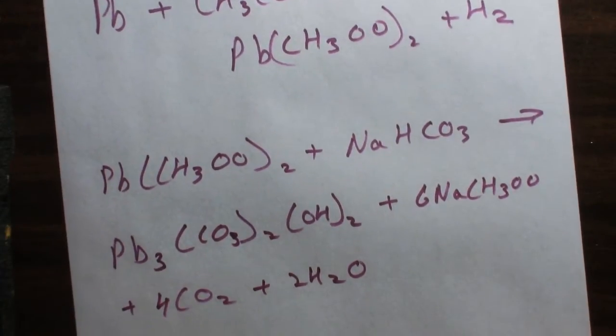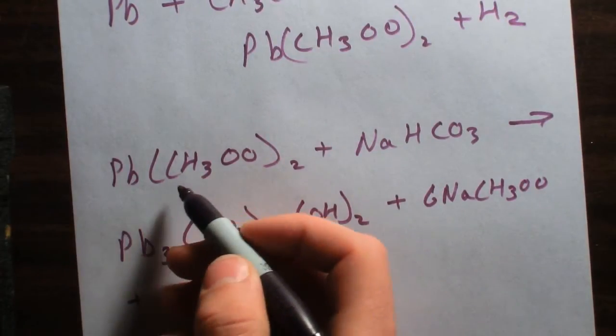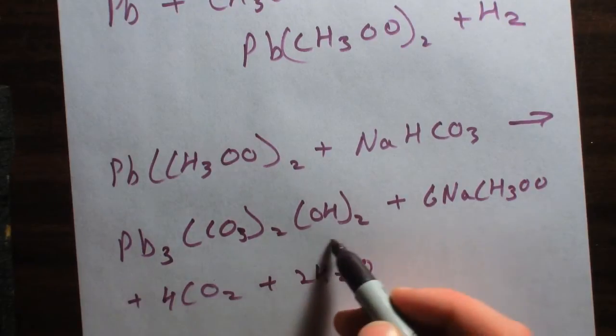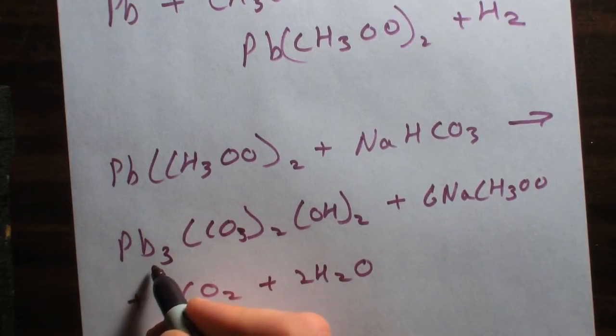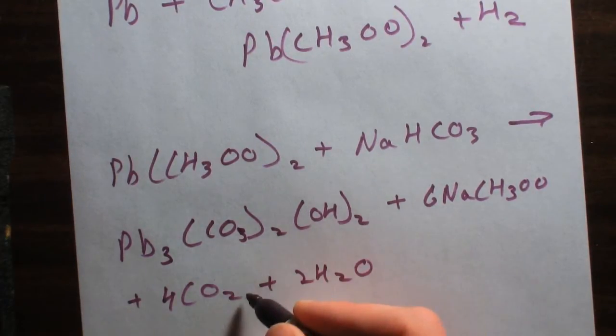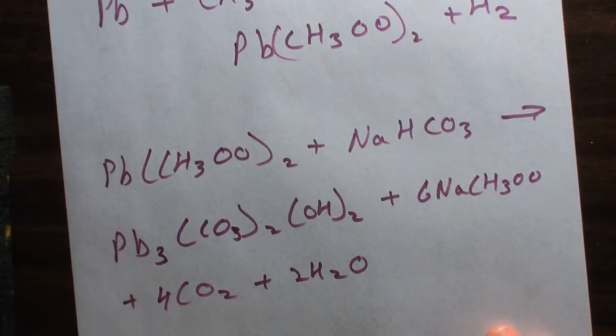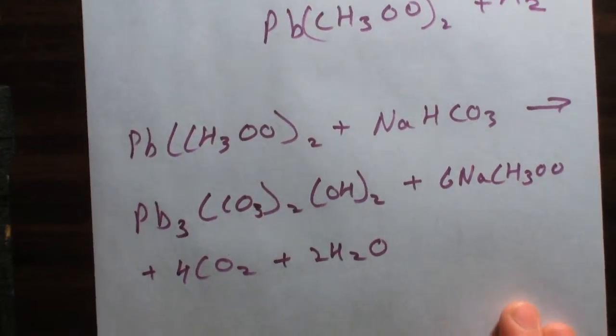So it's kind of a long reaction, but simply it's just taking lead acetate reacting with sodium bicarbonate and we're forming this insoluble basic lead carbonate or white lead. And all this other stuff is going to be gas, water, it's going to be liquid, and then this will stay in solution so we can just filter this off and dry it and continue on.